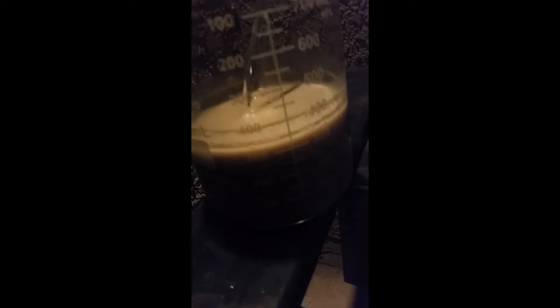It is about 350 milliliters. It kind of looks weird because it has three different layers. Keep stirring and mixing. Once it's all dissolved, put it inside here. When I start putting it in, I'll be back.